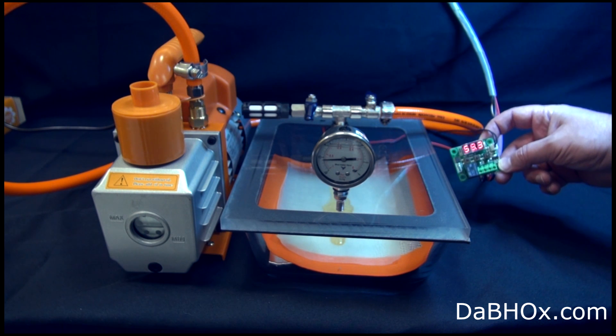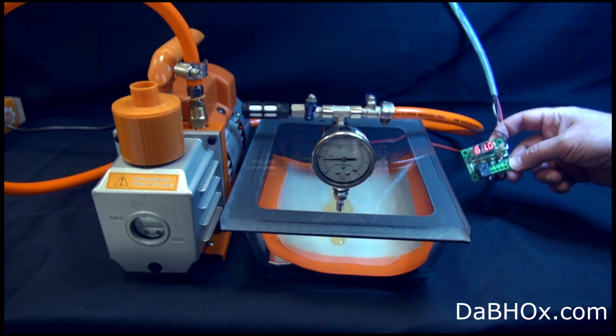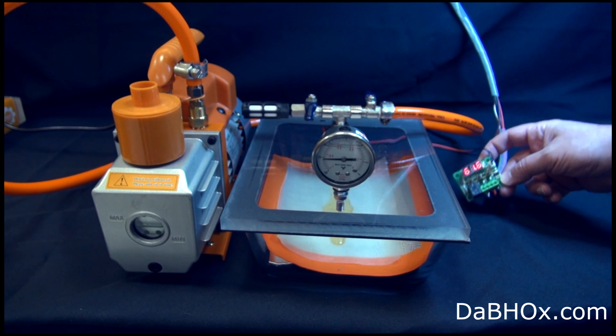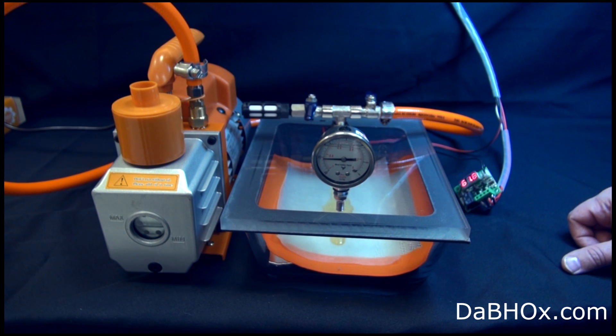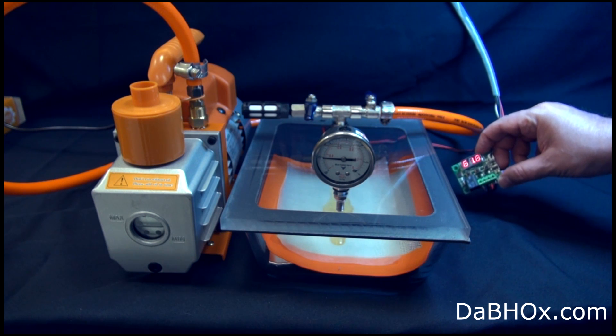And you can see it shuts off and brings down temperature. It's pretty much going to keep to 57 degrees Celsius, so 135 Fahrenheit. And again you can actually set the temperature from zero to literally 200 degrees Fahrenheit. You can also set the settings and not go over the limit of the temperature.